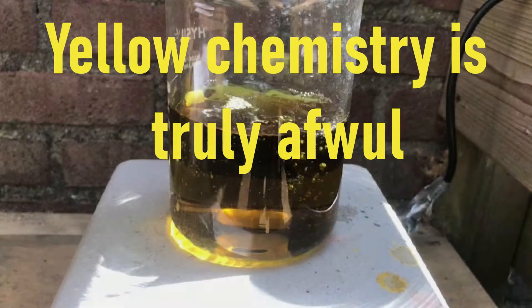But then the yellow strikes and the nitration completely fails. I think there was too much water in my sulfuric acid and I should have boiled it for quite a bit longer. But isn't that how you learn? By making a mistake a million times over, right?